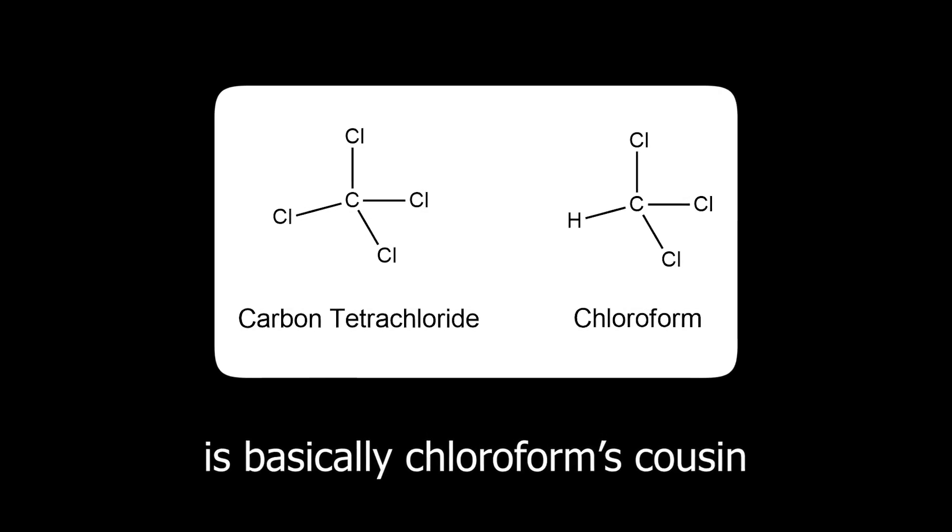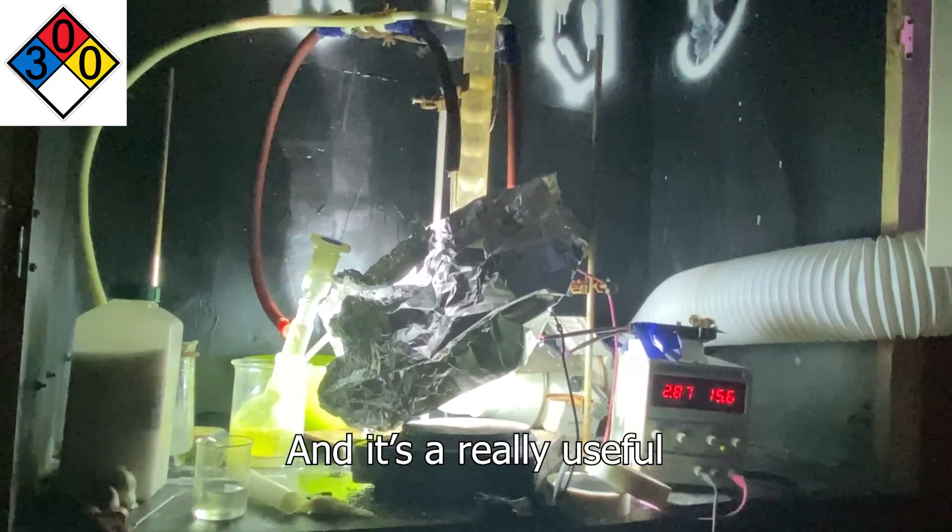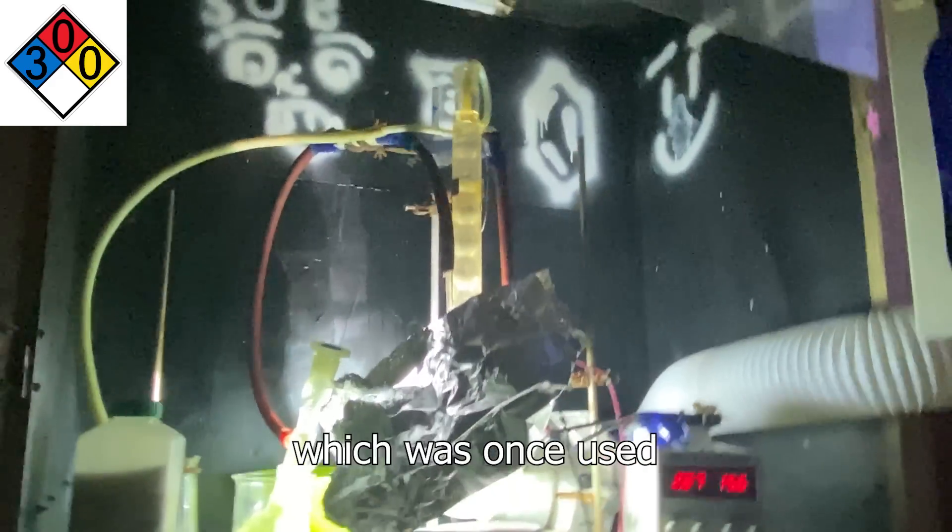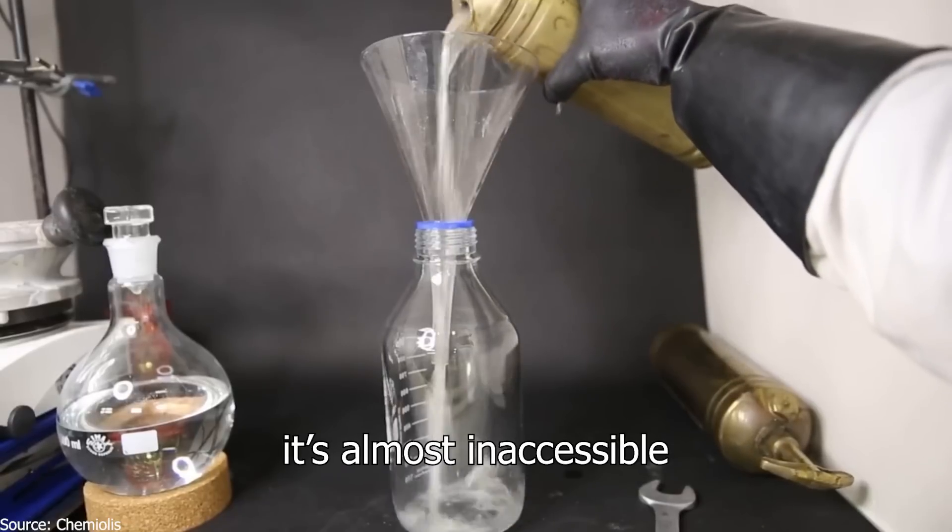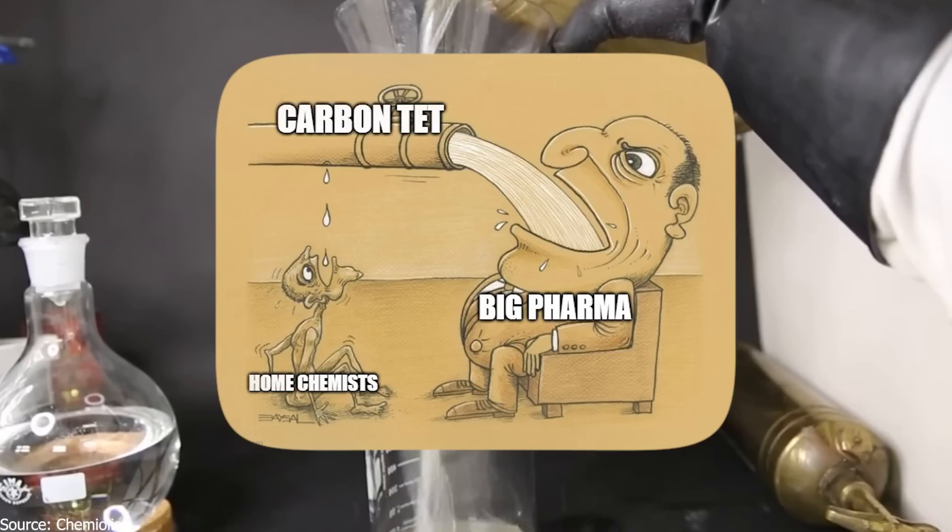Carbon tetrachloride is basically chloroform's cousin, but one chlorine higher. It's a really useful but very carcinogenic solvent which was once used in fire extinguishers, but nowadays it's almost inaccessible to the everyday person, which is just sad.